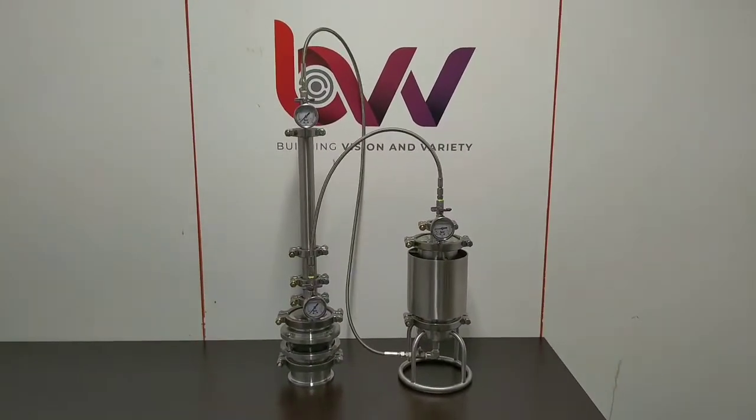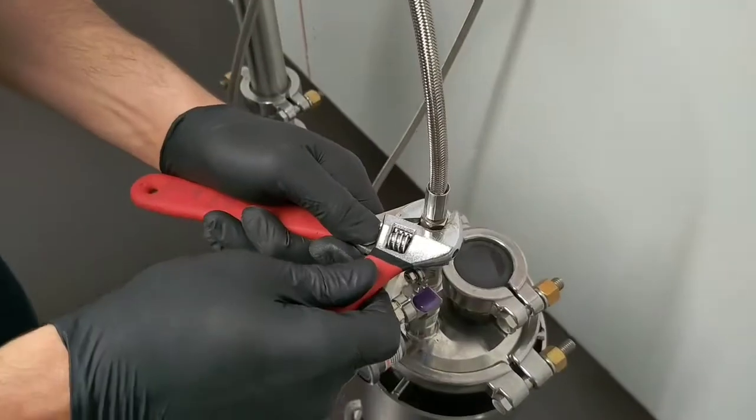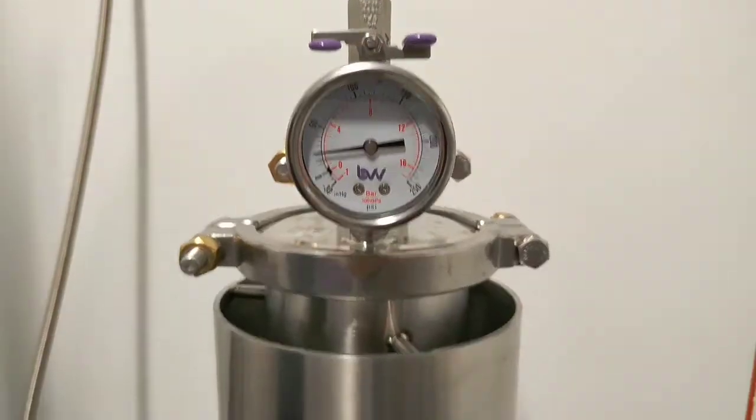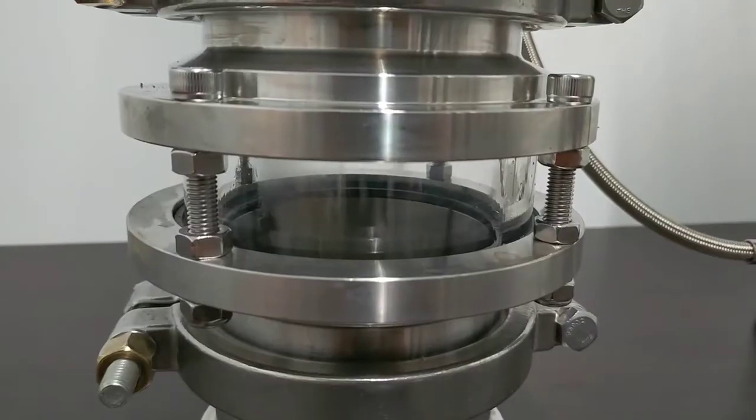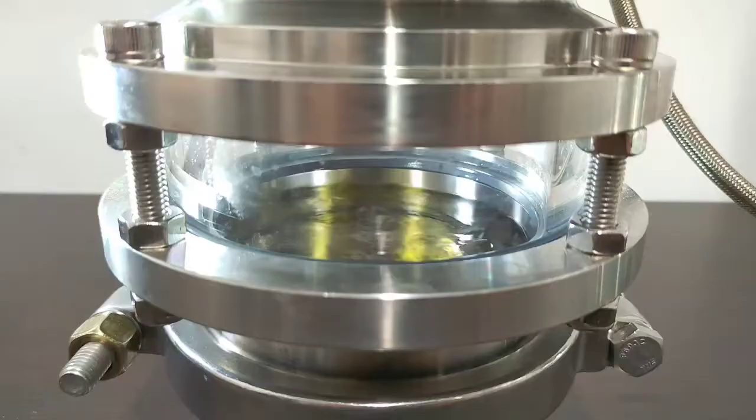Take the system to a safe extraction location, apply your lines, and tighten each one individually. Now inject 1.1 pounds of solvent into your material column and allow the solution to drain completely into the collection base.